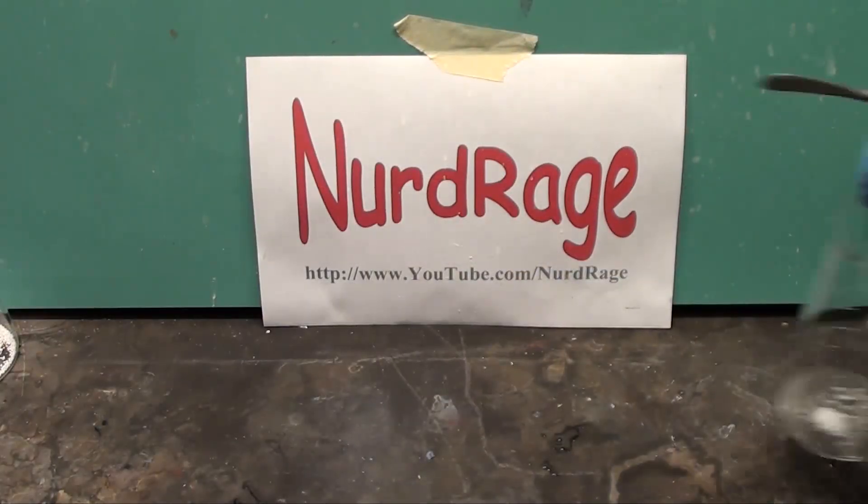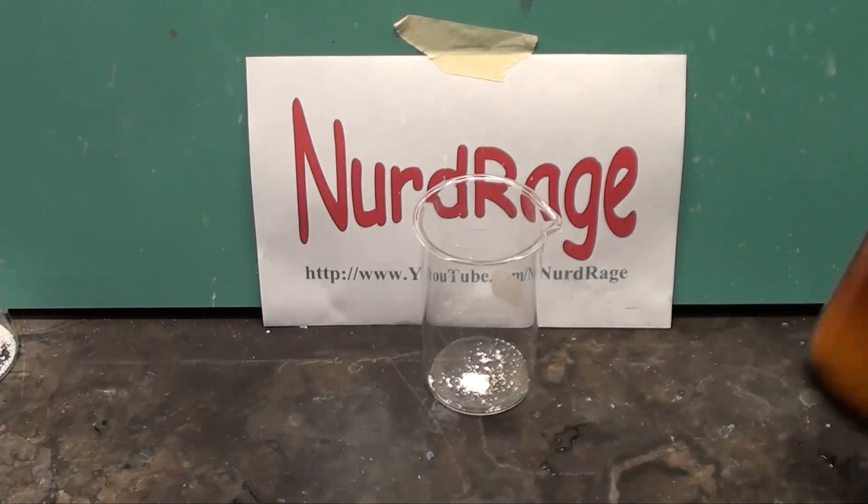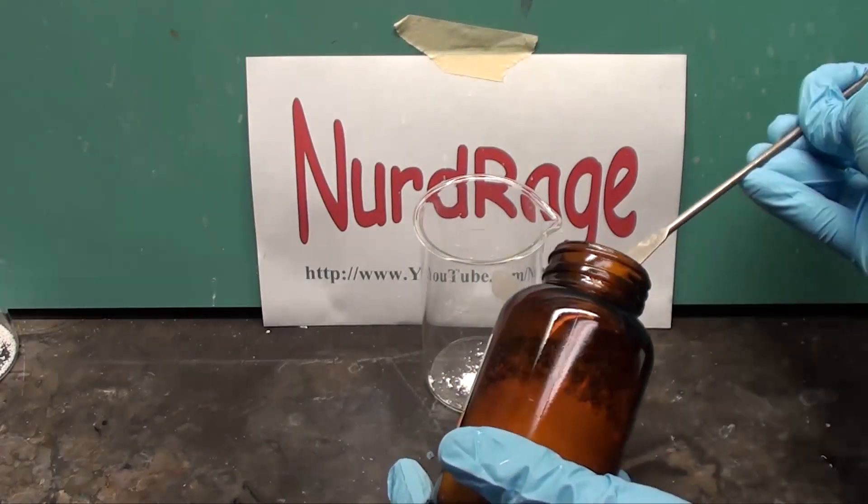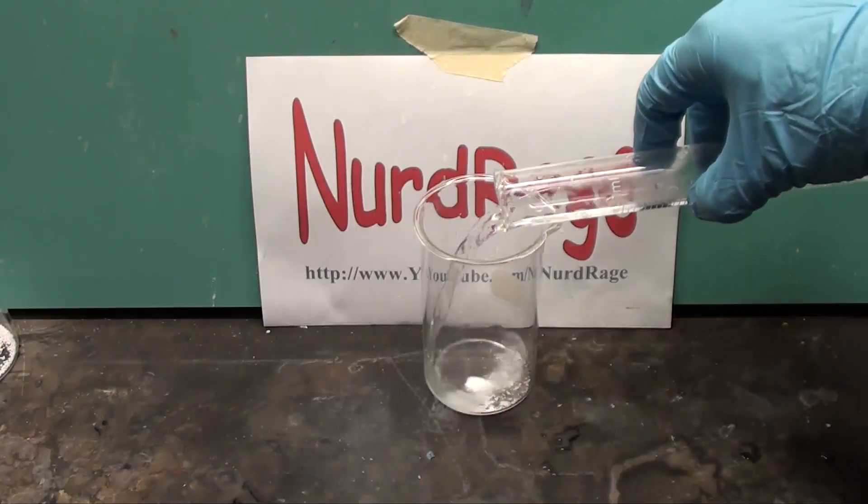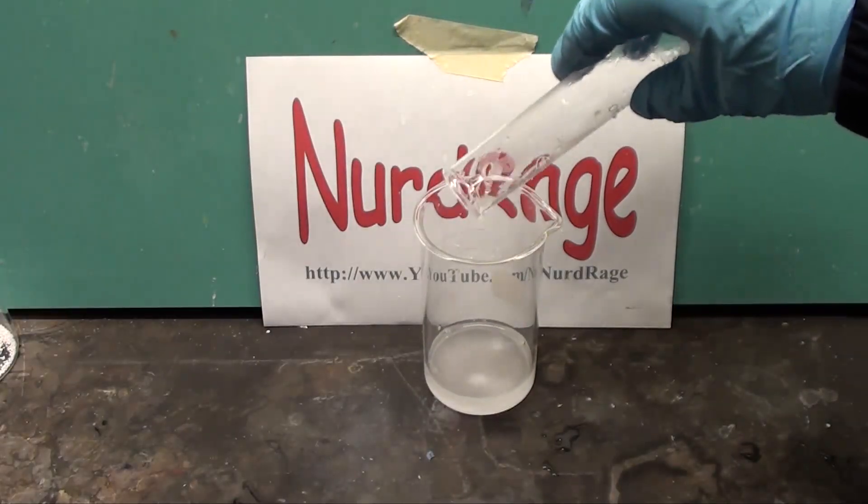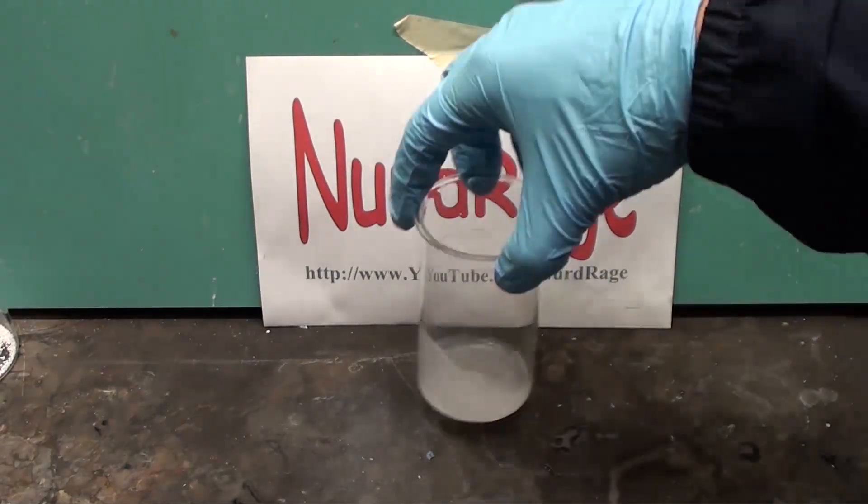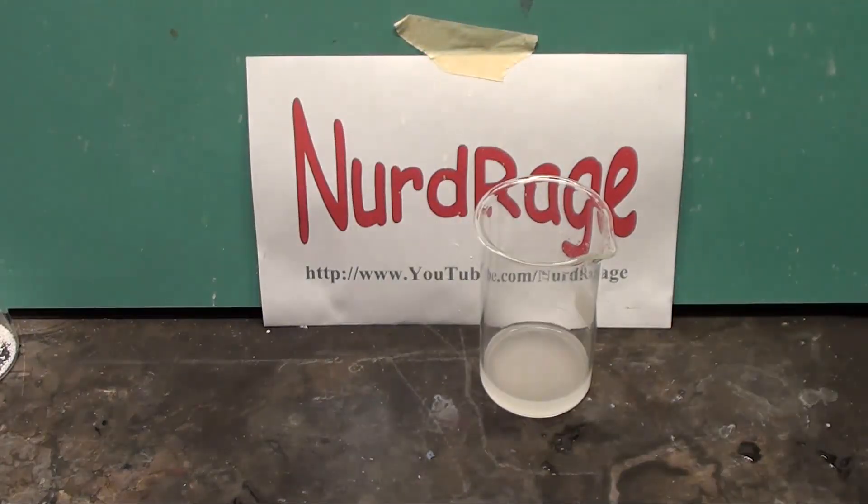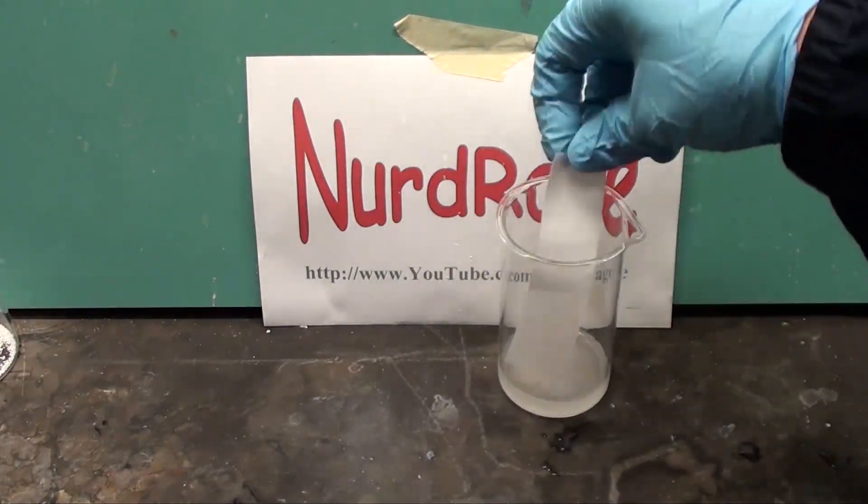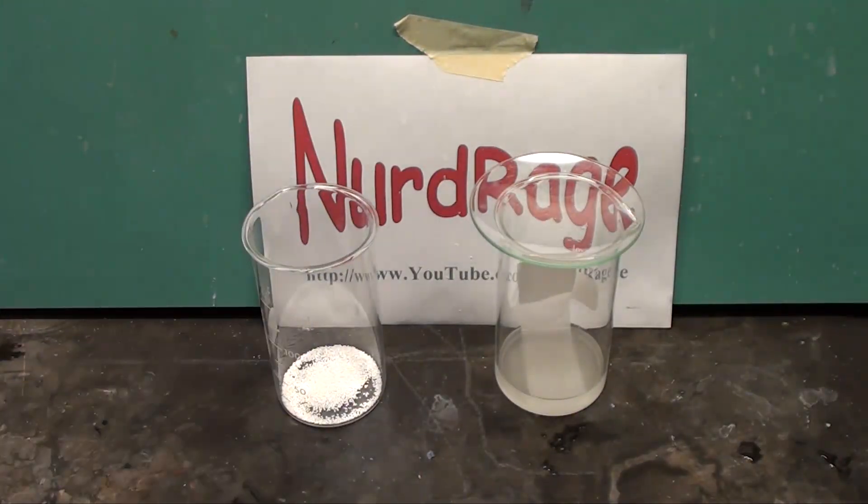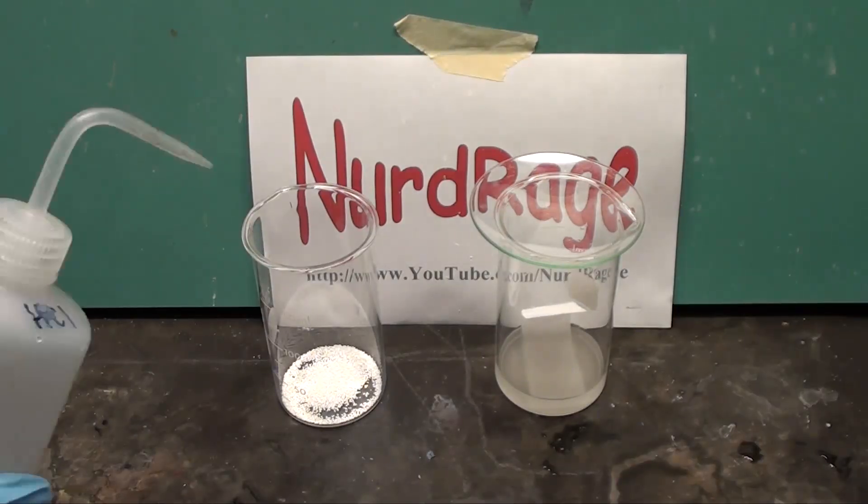To test for chlorine gas you can make a test solution by mixing about 100mg of starch with about half a gram of potassium iodide and 20mL of water. The exact quantities aren't critical. Shake it up to dissolve as much as you can. Dip in a strip of filter paper to soak it up. Now I'm going to cover it to protect it from the chlorine that I'm going to make over here.